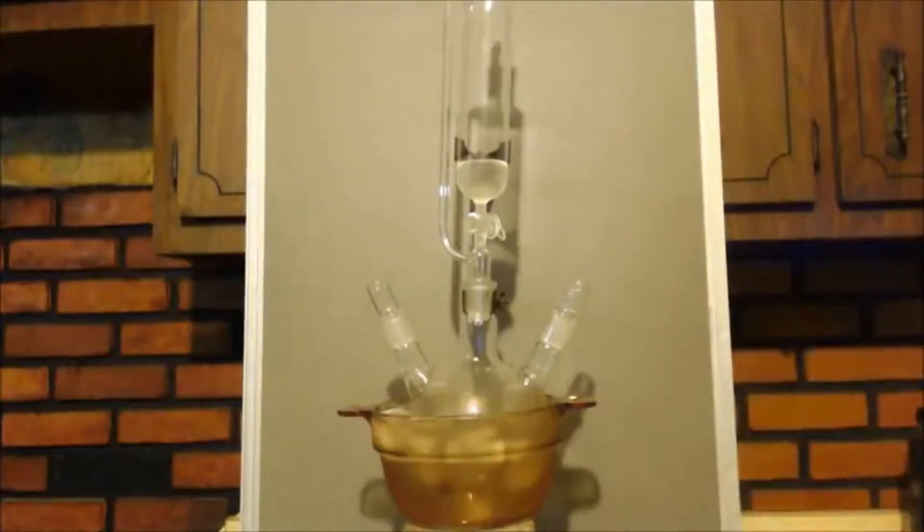I'm going kind of fast there, but I put everything in the freezer, even the glass. I've got it spinning in there, still nice and clear, the room is cleared. I'm going to drip this in and I'll get back to you after it's dripped in and warmed up to the right temperature. Then we'll add our sodium bromide solution and distill off our product. It's that easy.